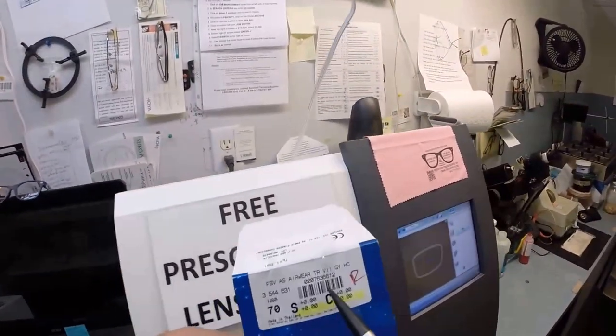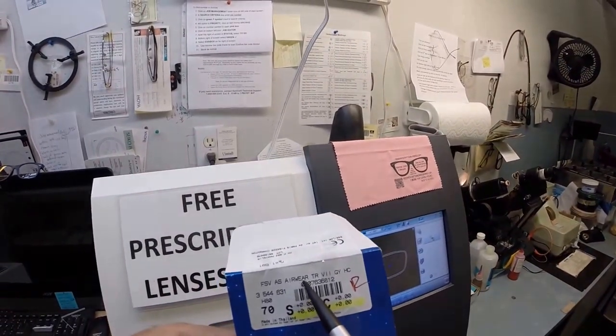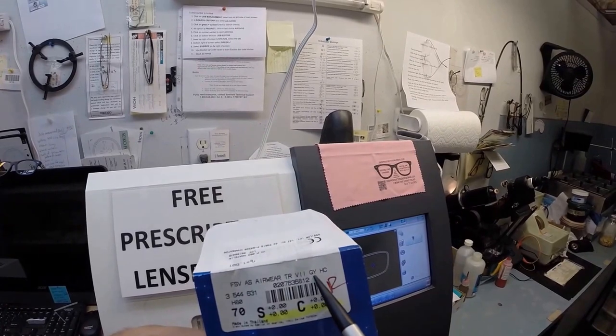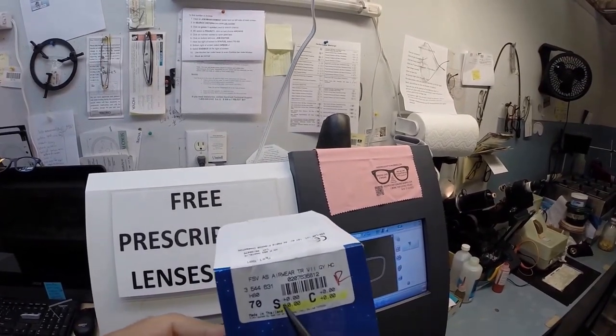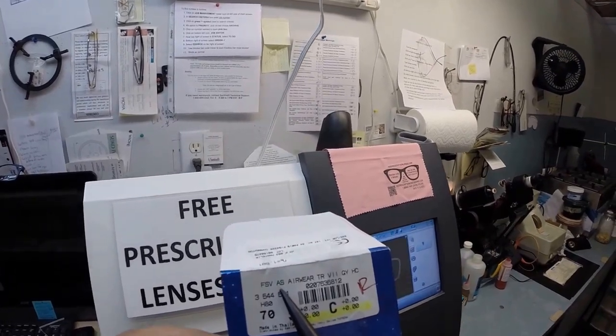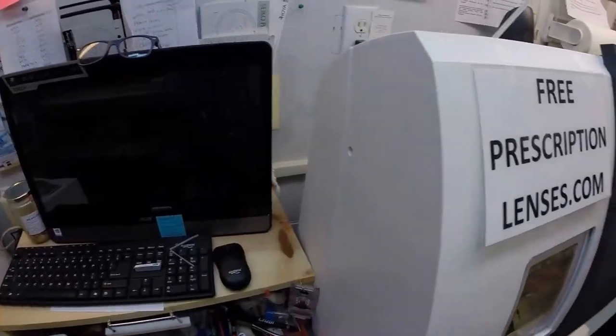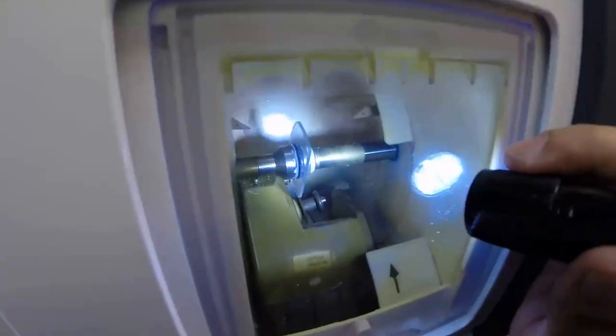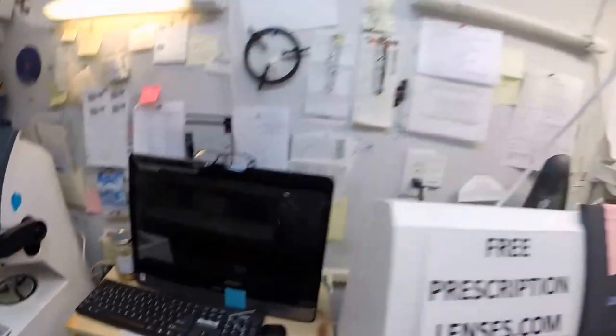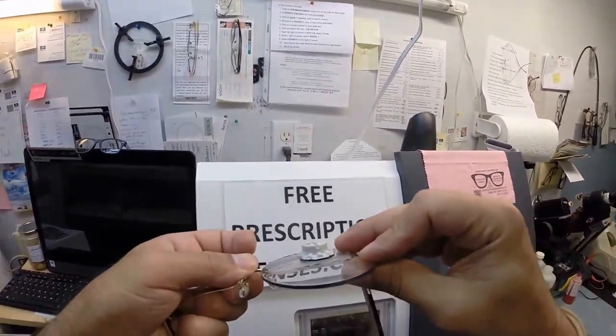Bulletproof up to 22 caliber. It has both UVA and UVB protection built into the lens. We know what the sun's harmful ultraviolet rays can do to your skin. Your eyes are eight times more sensitive than your skin. So you have permanent sunscreen for your eyes. Unlike the lotions, creams, and sprays that need to be reapplied every couple hours when you're in direct exposure to the sun, which is quite often in Los Angeles, this is permanent and will never need to be reapplied. The other nice thing about your lenses, they are the airwear. TR stands for Transition Signature 7 Series. GY is gray. The AS stands for Aspheric. Aspheric simply means not spherical. A spherical lens is completely round in every direction. Aspheric lenses are much flatter to fit in today's flatter curvature frames.